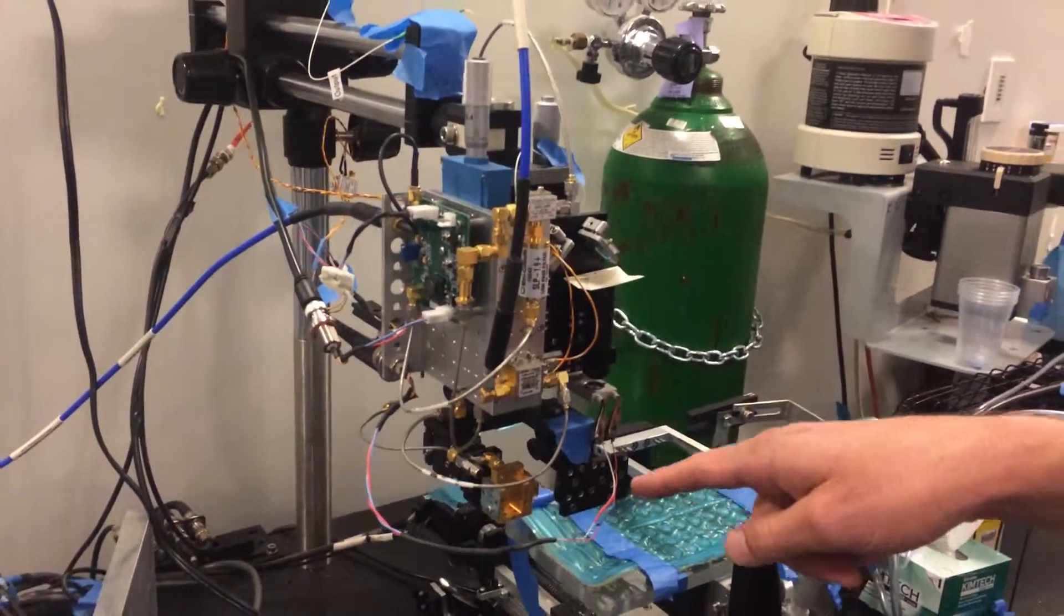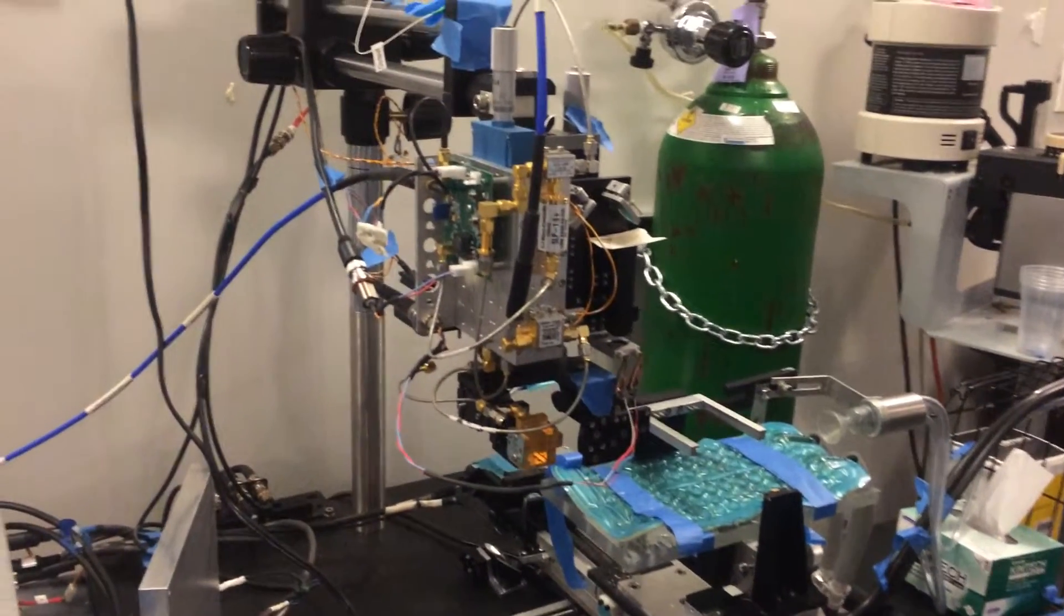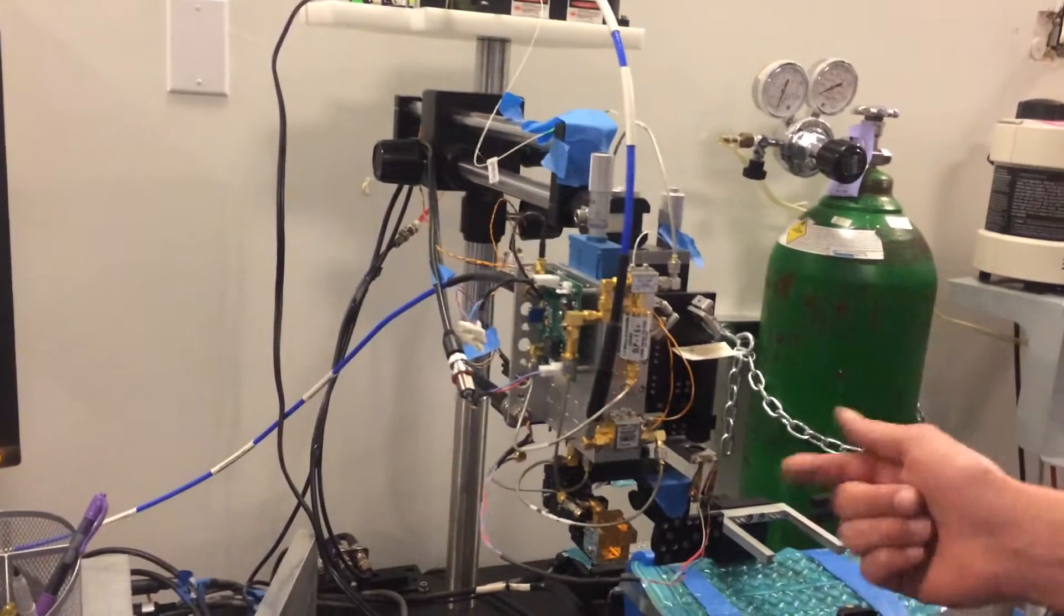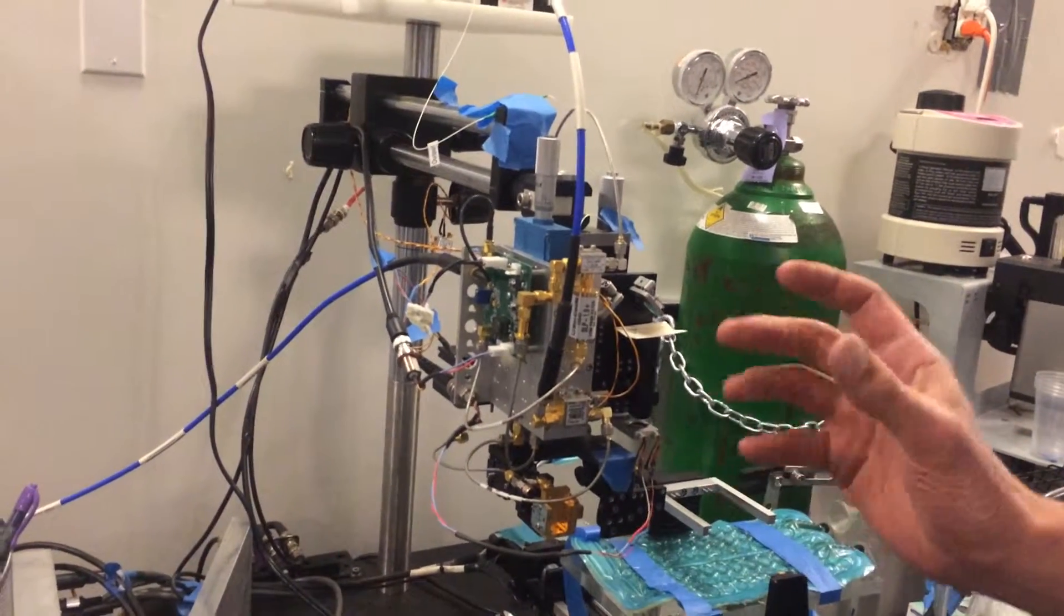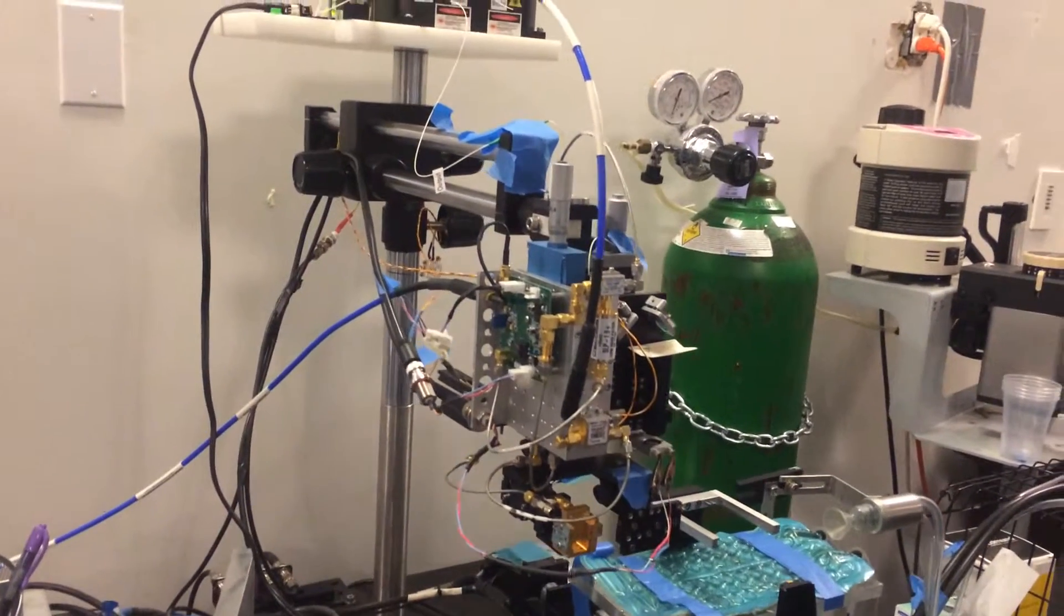The RF bandwidth is a couple hundred gigahertz. Video bandwidth is around 10 to 15 gigahertz. So we have really fast pulses, terahertz pulses coming in. And the rectified pulses have a really broad band, about 10 gigahertz. And we use this gated receiver to detect the pulses.